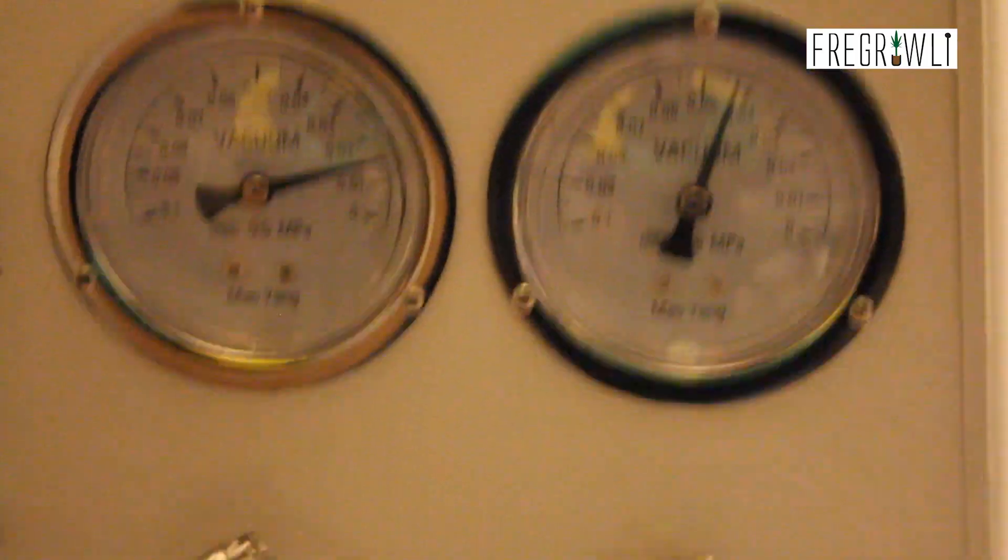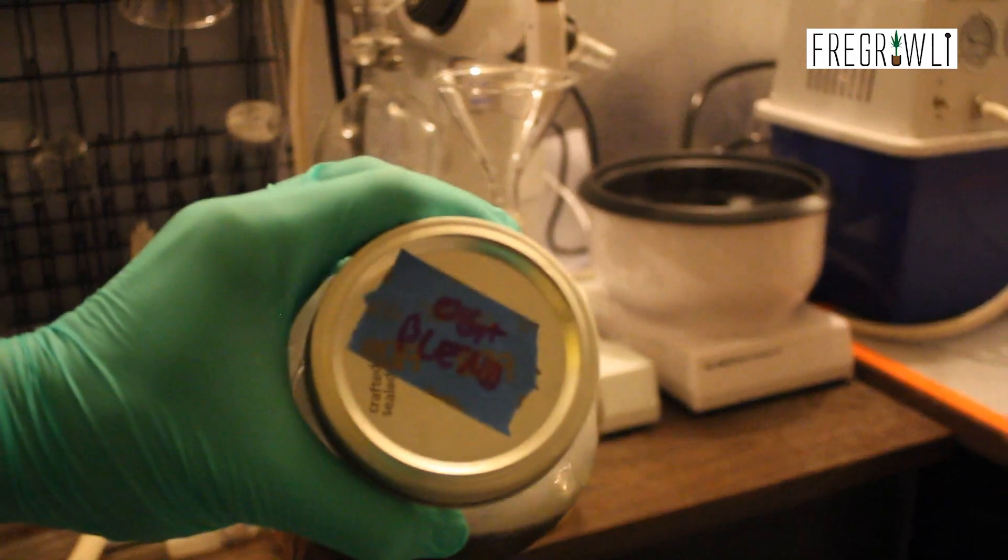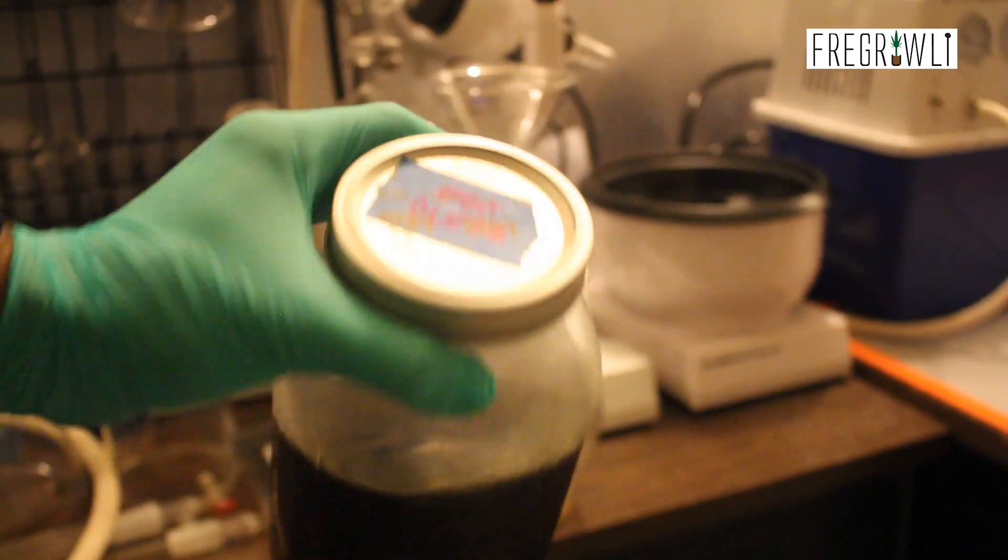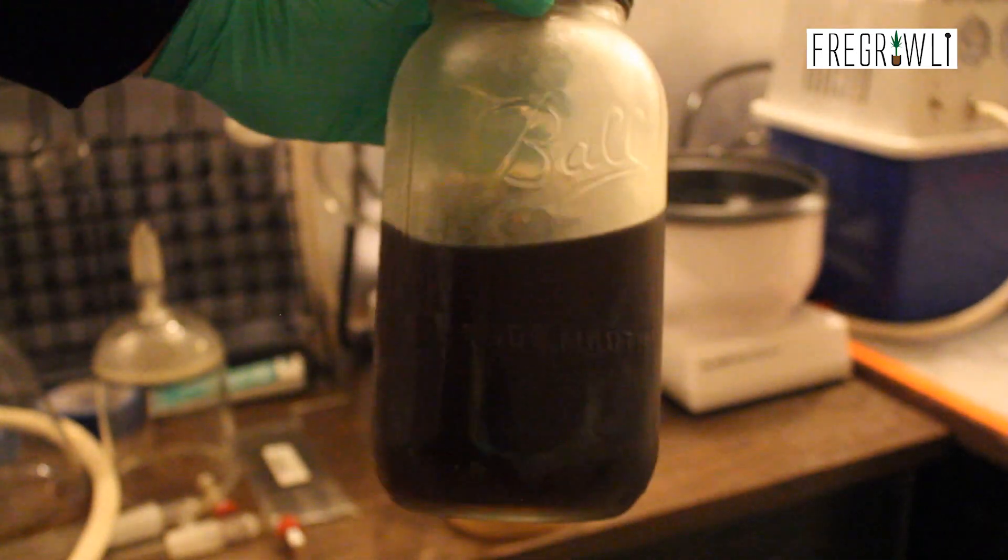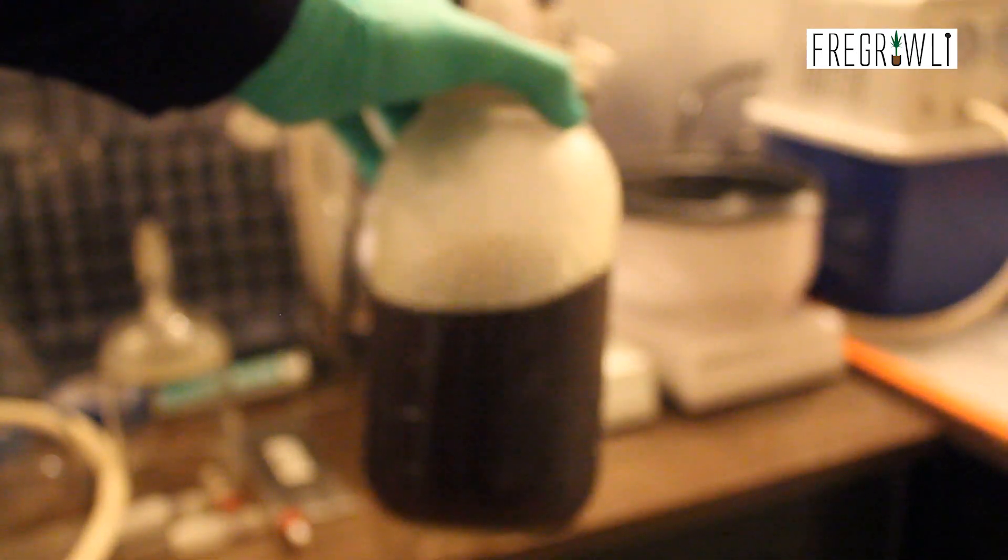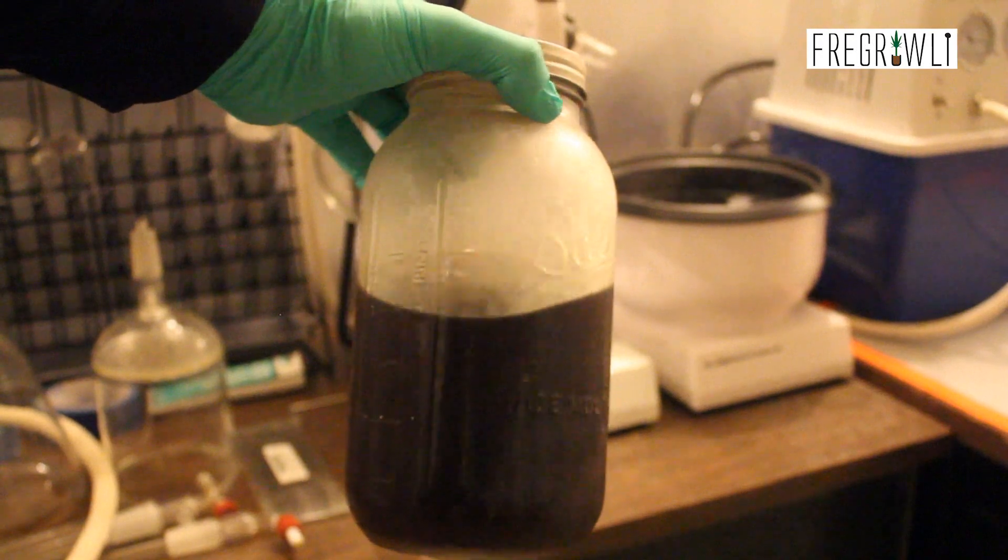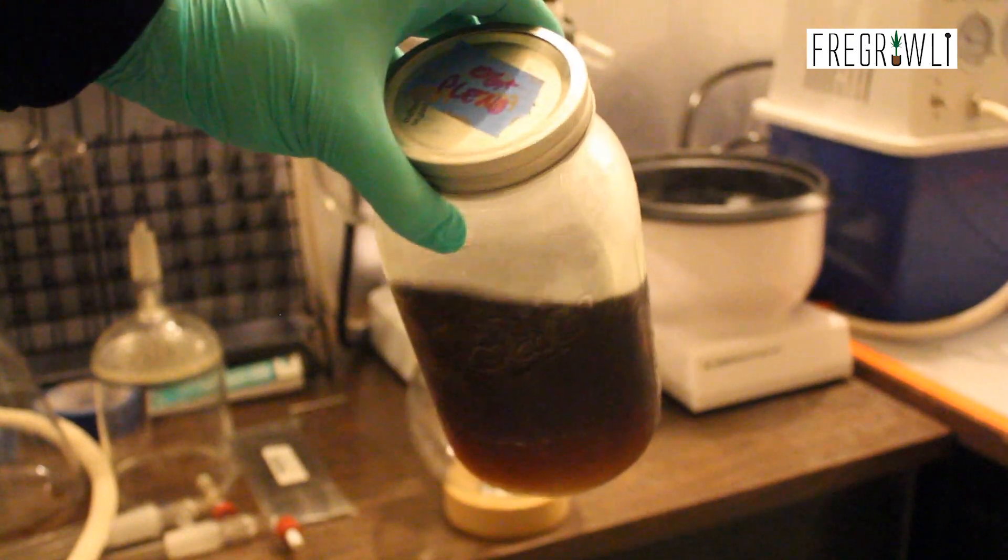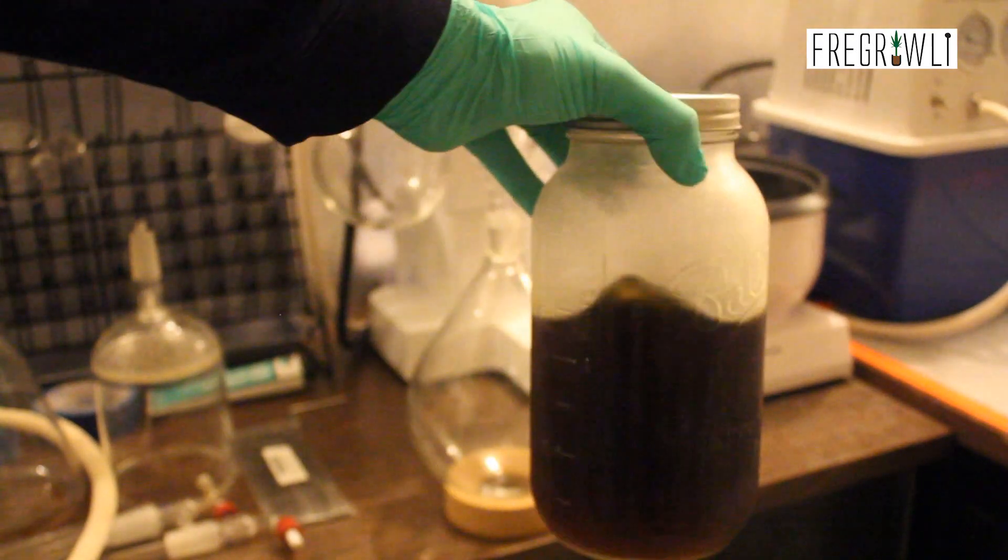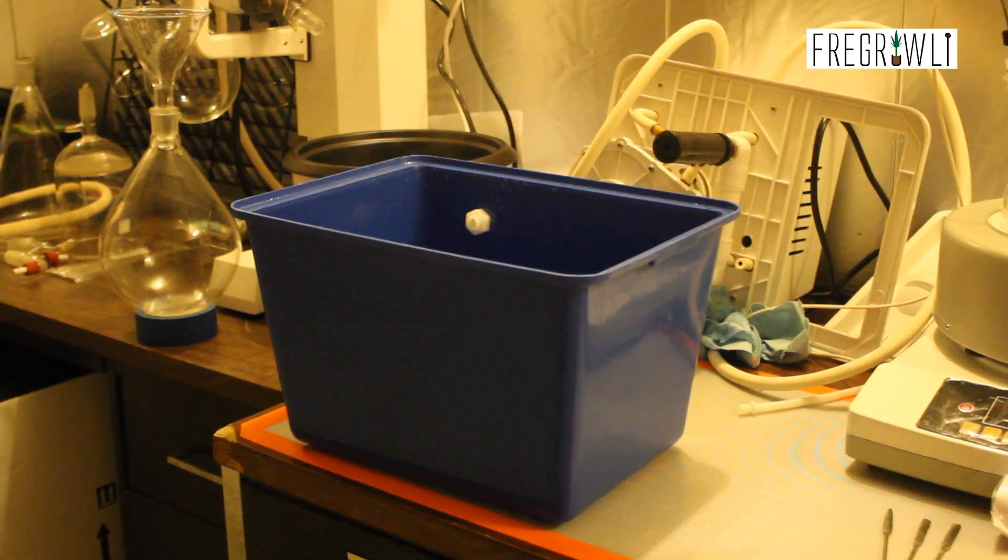Now that you know what the parts of the rotovap are and what other items you might need, let's take a look at my process. First and foremost, always make sure you clean your unit in between runs, just as you should with any extraction equipment. If you do not sterilize your equipment, you could potentially pull over contaminants from previous runs, including unseen chemicals like pesticides or molds.